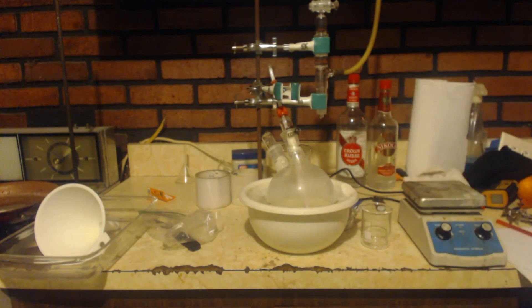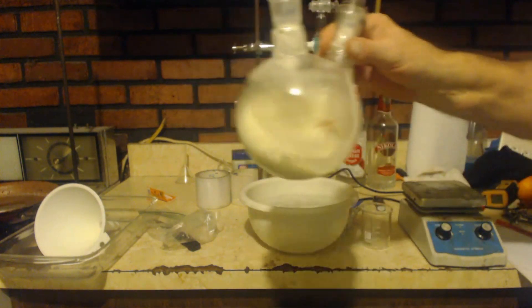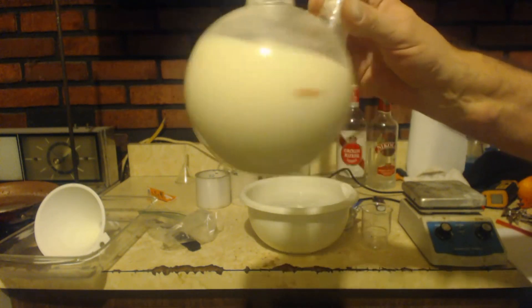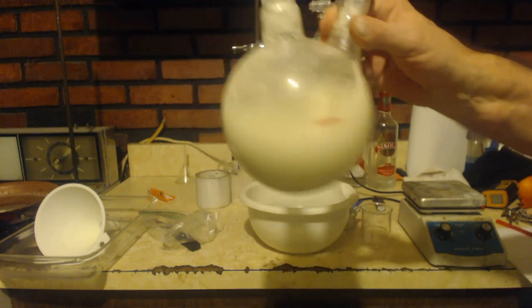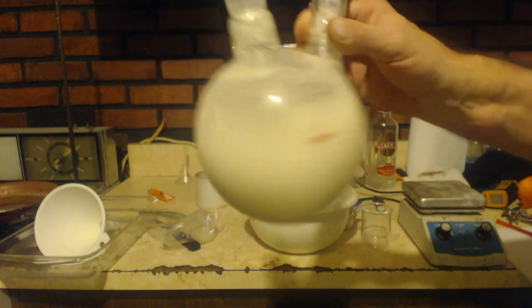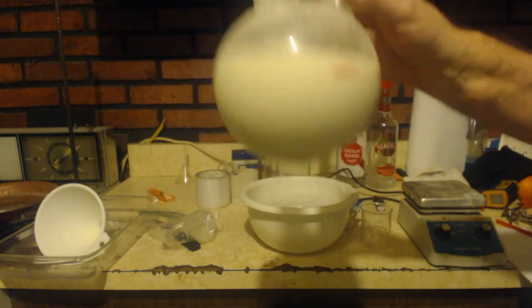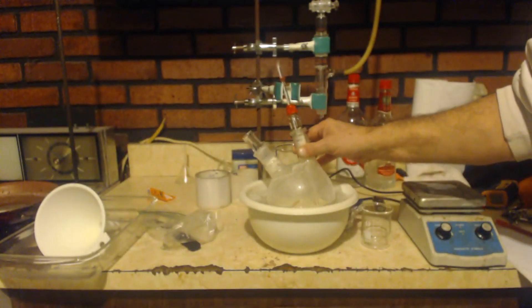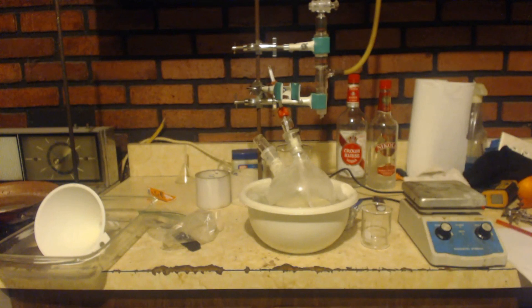So there was another mistake. This has been one mistake-filled video. When I made the ether and ethyl bromide, I didn't dry them out at all. I ran out of calcium chloride, which I usually use to soak up any alcohol. I did a really crappy job making the diethyl ether definitely. We'll see how much of a difference all these mistakes make in the yield.